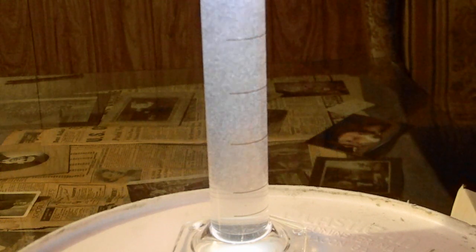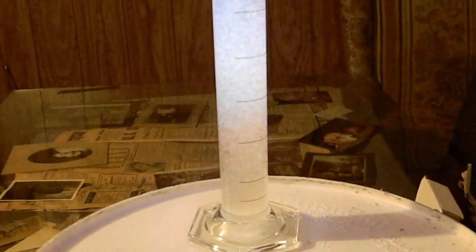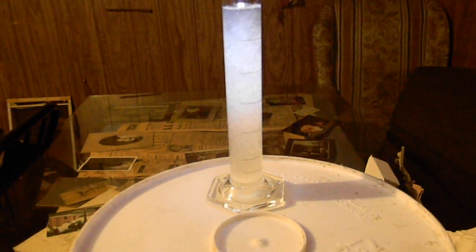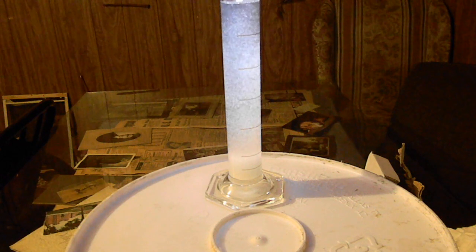We have nothing in the bottom. Now we are going to add the chloride. And if we're lucky, we'll start to see the salts snow out of solution. There we go. So that is a double decomposition reaction — what you are seeing here is the chlorine ion changing places from the sodium to the potassium, causing it to crash out of solution.